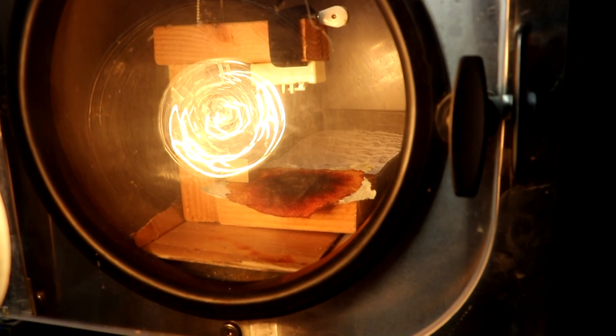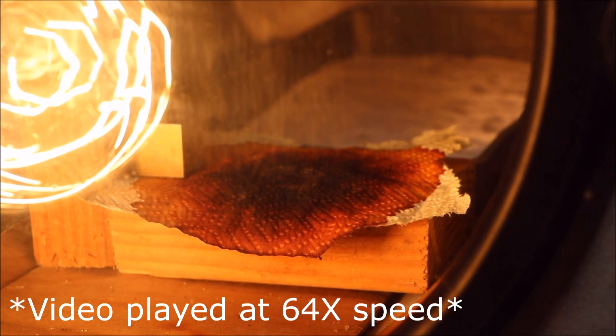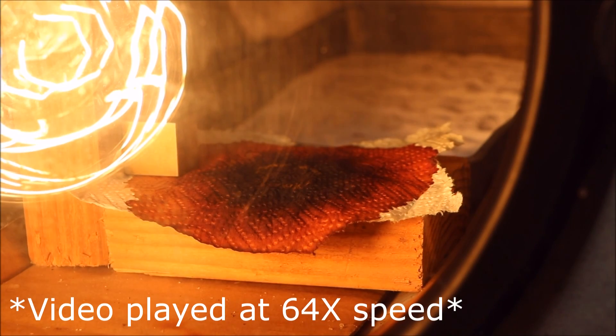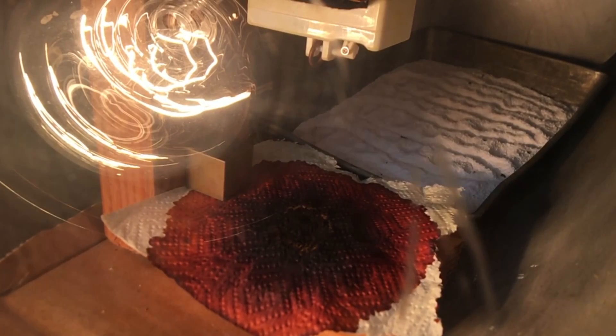Maybe we've got a good seal now. Set the air vacuum out. I'll try to keep the camera on it in case it explodes while it's depressurizing. Alright, I think we're ready. It's been drying for a little while — it's under vacuum. Start the slow-mo camera. I'm going to drop the ring in two seconds. See that? It just bounced off the nitrogen triiodide. It did not set it off.